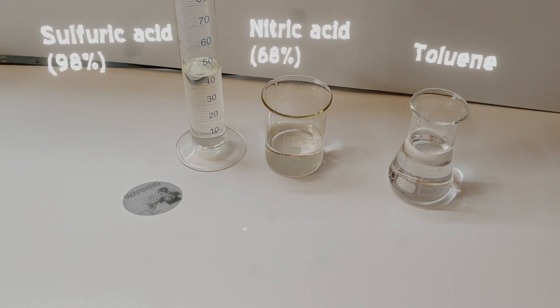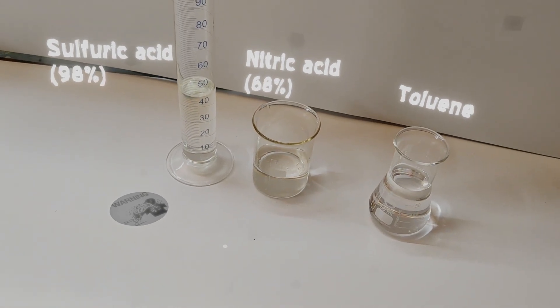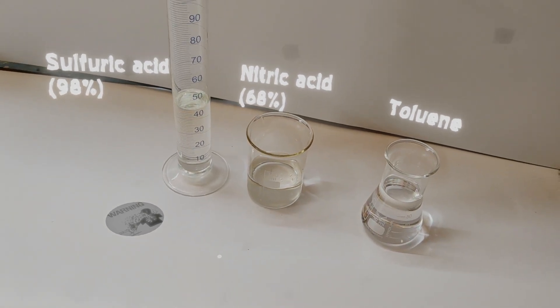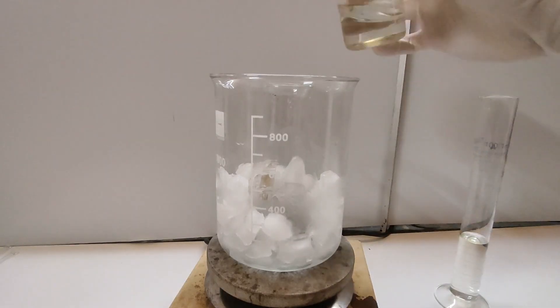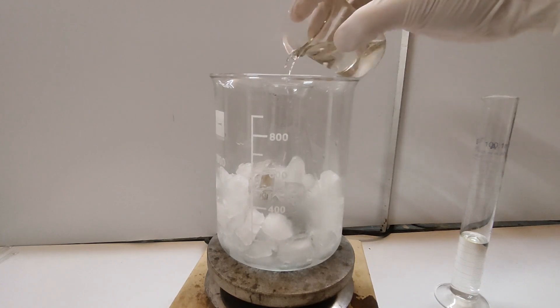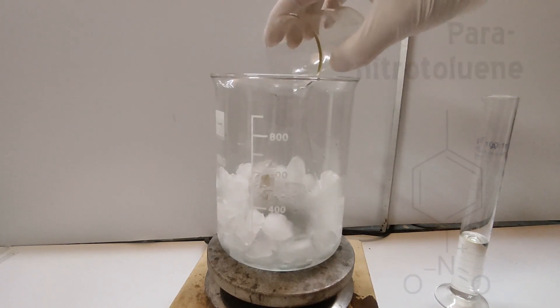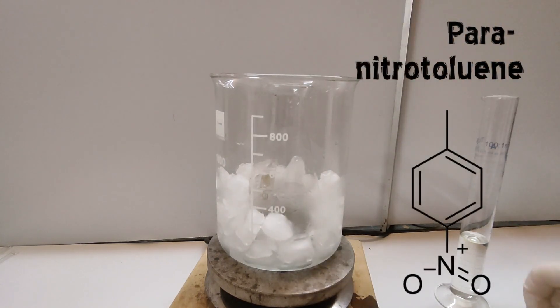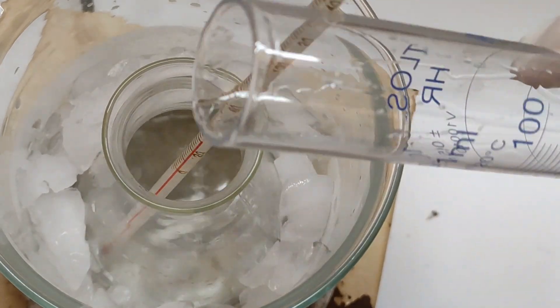In this video we'll be synthesizing nitrotoluene, an industrial building block for organic synthesis. Nitrotoluene comes in two isomers: paranitrotoluene and orthonitrotoluene. We can isolate both.